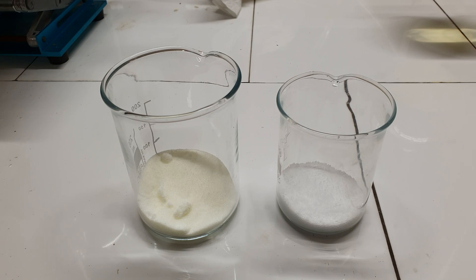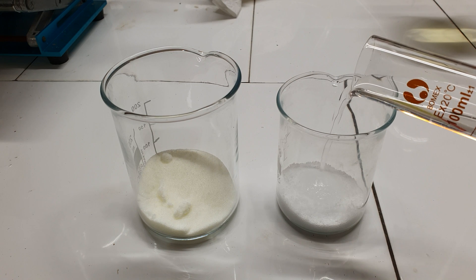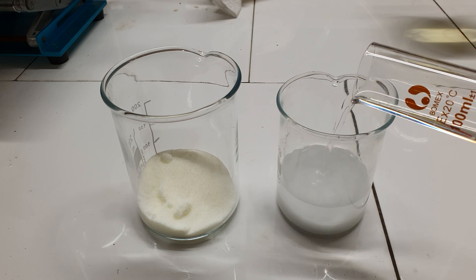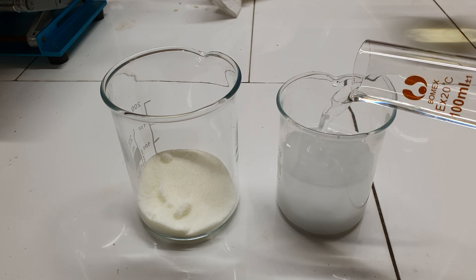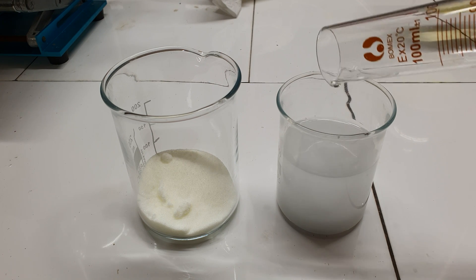To the sodium hydroxide, I added 100 ml of distilled water. The idea here is to make a solution containing 40% sodium hydroxide.